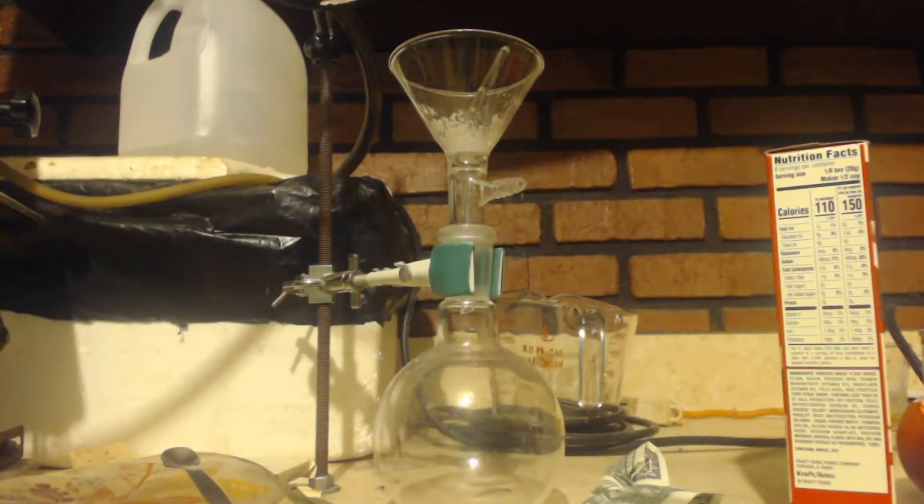Now when I make the nitroethane, I mean, I have to heat up the pot up to 120 C. So my hopes is that using this sodium ethyl sulfate that has this ethanol attached to it in its crystalline lattice, I'm hoping that when I heat it up, that will break apart and the ethanol will distill out first. Then I'll take the pot up to 120 C and start the reaction. I'm hoping. At least that's my thoughts. And if it hurts the yield or whatever, then the next time I'll try it without the ethanol being part of the crystalline lattice.